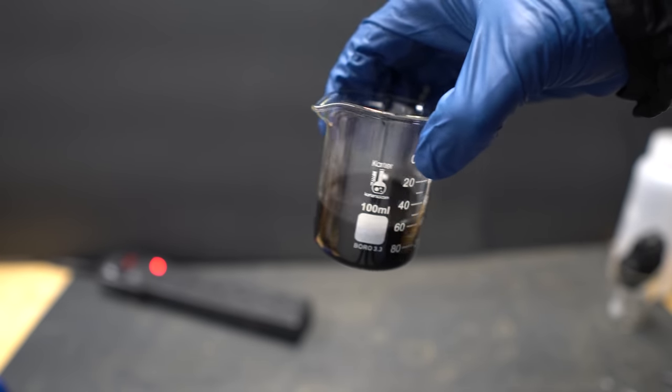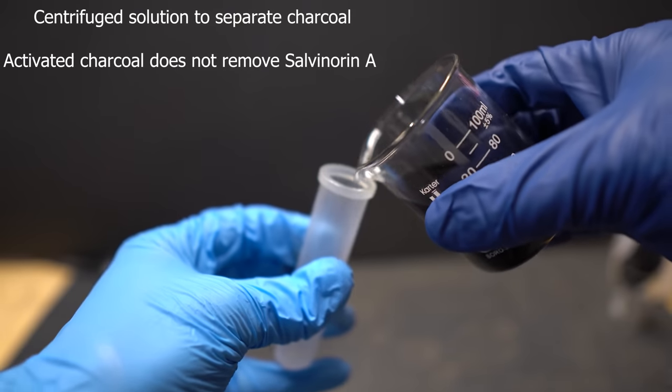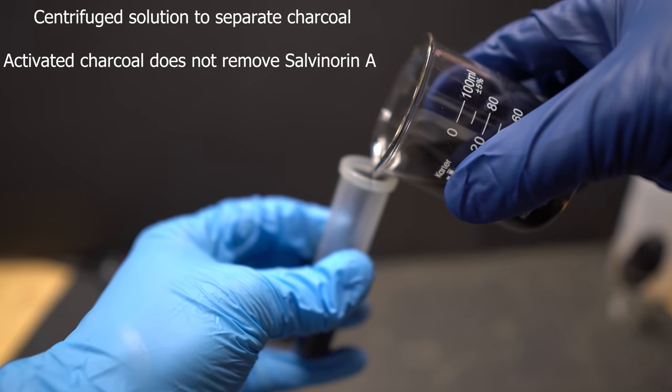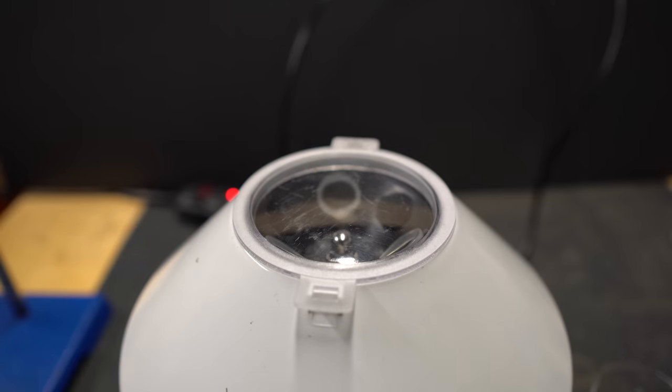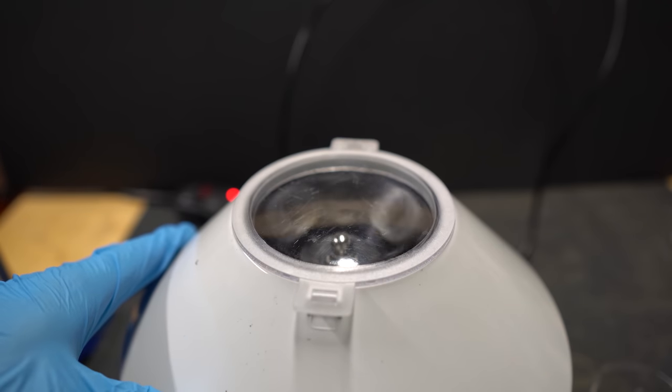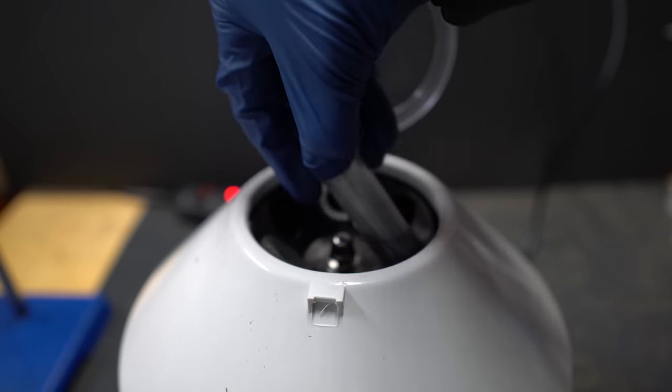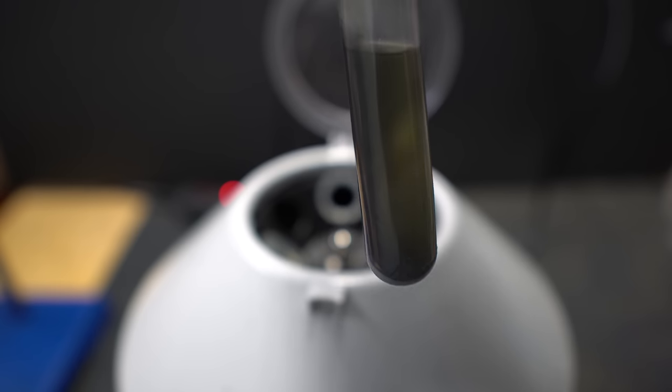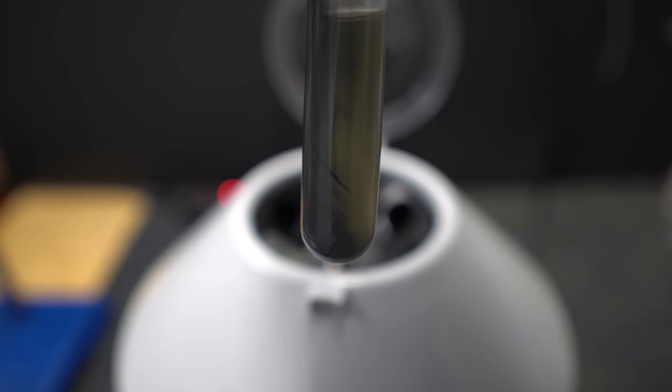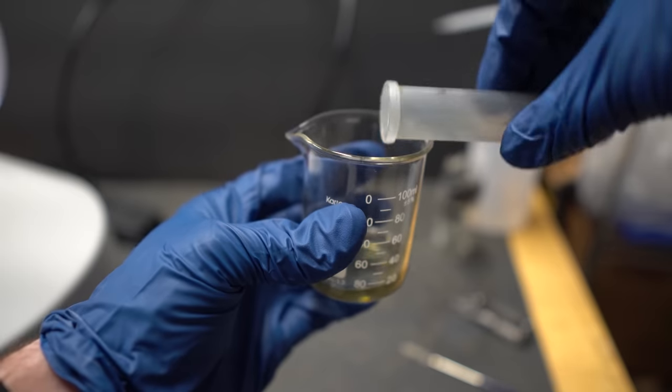Unfortunately this means I have to centrifuge everything again just so I can get the insoluble activated charcoal to the bottom and then pour out the acetone. This was the additional annoying step that I talked about earlier. The good thing is that activated charcoal is not soluble in acetone and it was pretty easily removed. I ended up letting it run for about 20 to 30 minutes and you can see the majority of the charcoal rests on the side and bottom of the centrifuge tube.